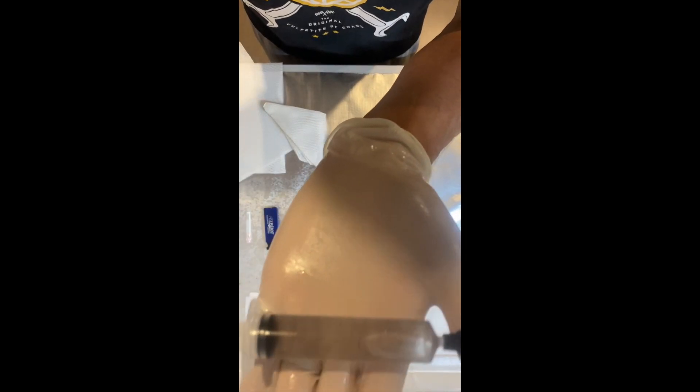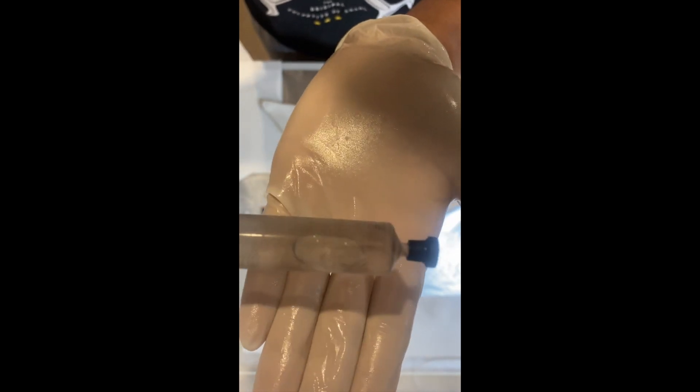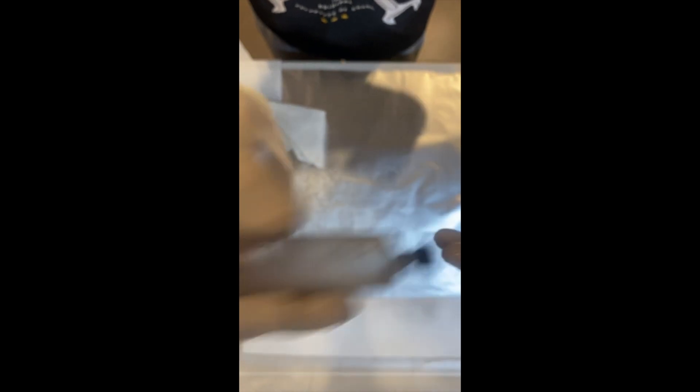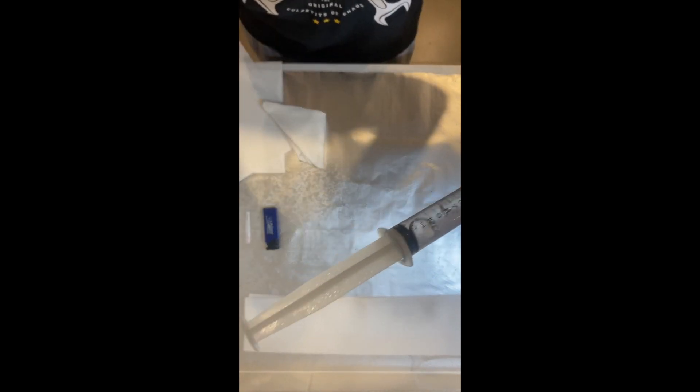You can see it is just sort of a gray cloudy liquid in there. We want to really shake that up. Shake, shake, shake. We're also going to give this a spritz with the alcohol.